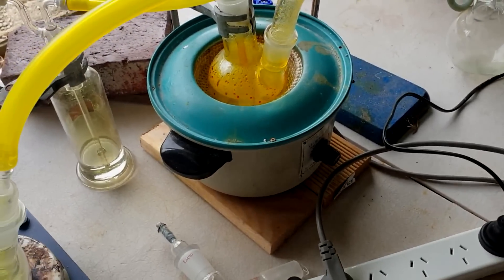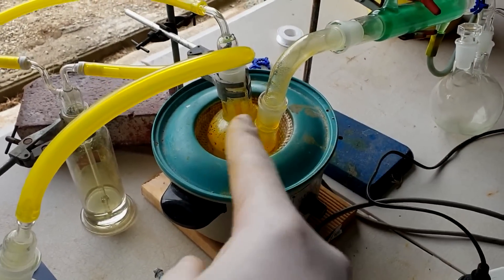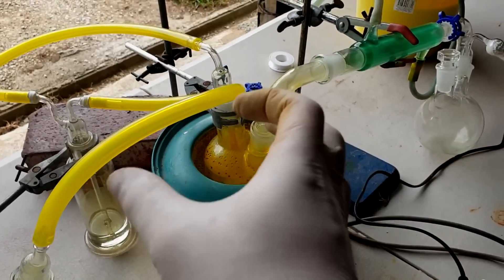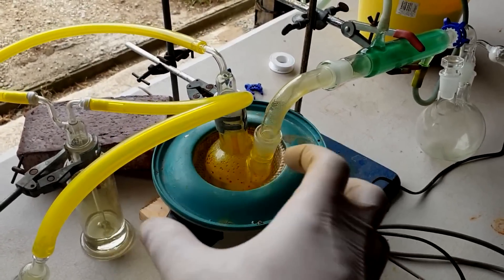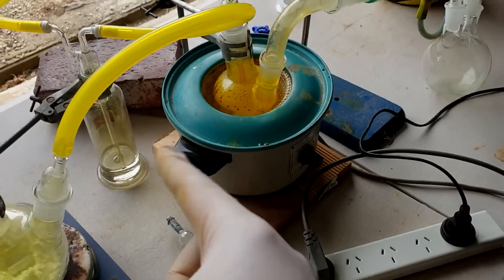Interesting thing — you can see those droplets now, they're very red; before they were quite yellow. If the droplets don't make it over to be distilled and they stay in the atmosphere of chlorine, they'll react further, because the yellow is sulfur monochloride — S2Cl2, so two sulfur, two chlorine. React with more chlorine further, they become SCl2 — that's two chlorine to one sulfur. And that's red. So that yellow to red transition is because of extra chlorine in the flask.